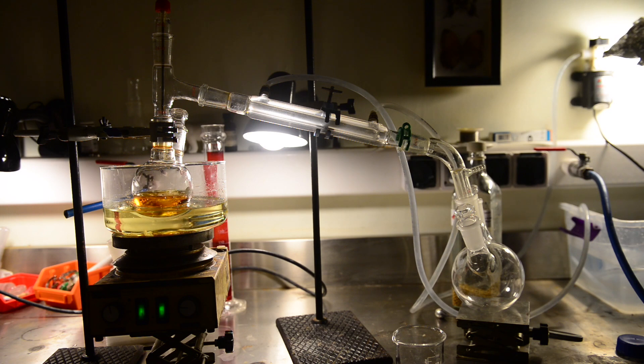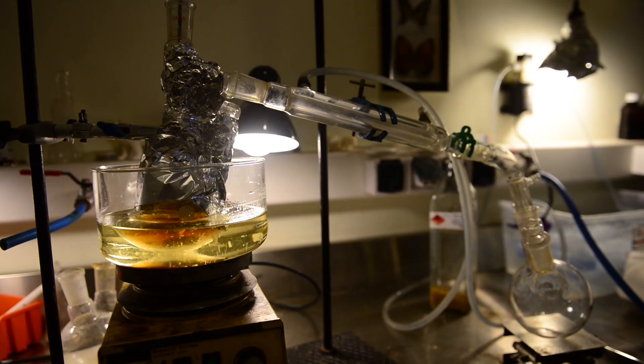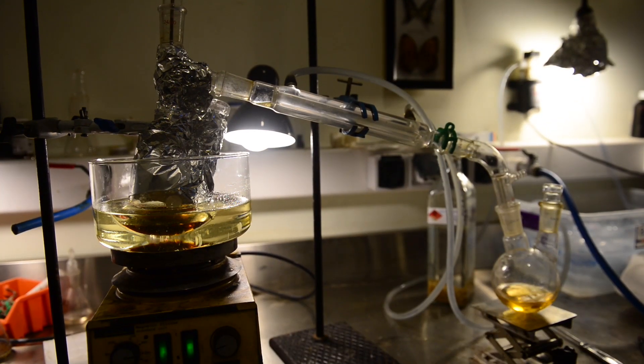We have assembled apparatus for simple distillation and have placed the filtrate to the flask. We will not use rotary evaporator as we did previously. The distillation of the solvent is not that time consuming process.